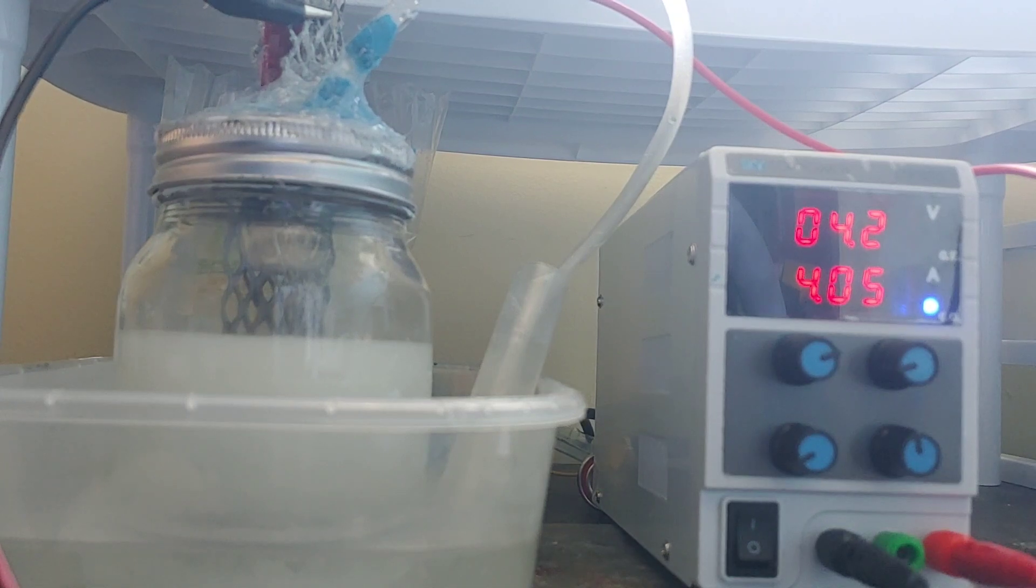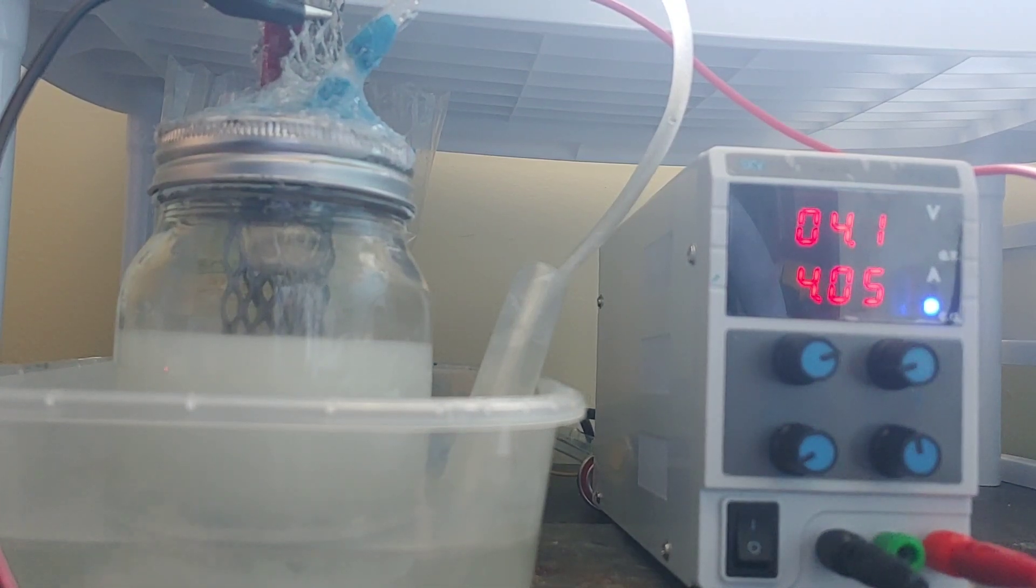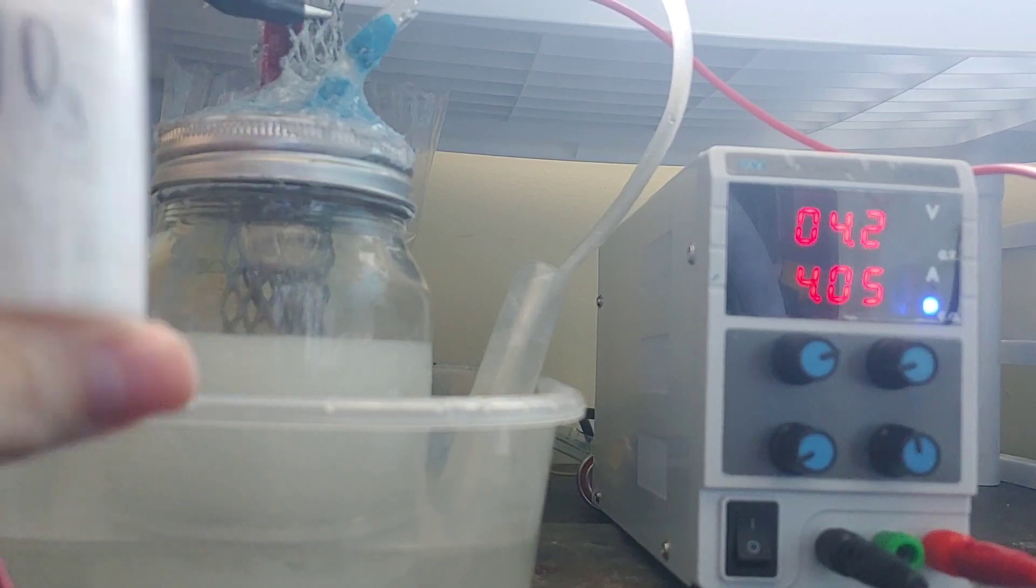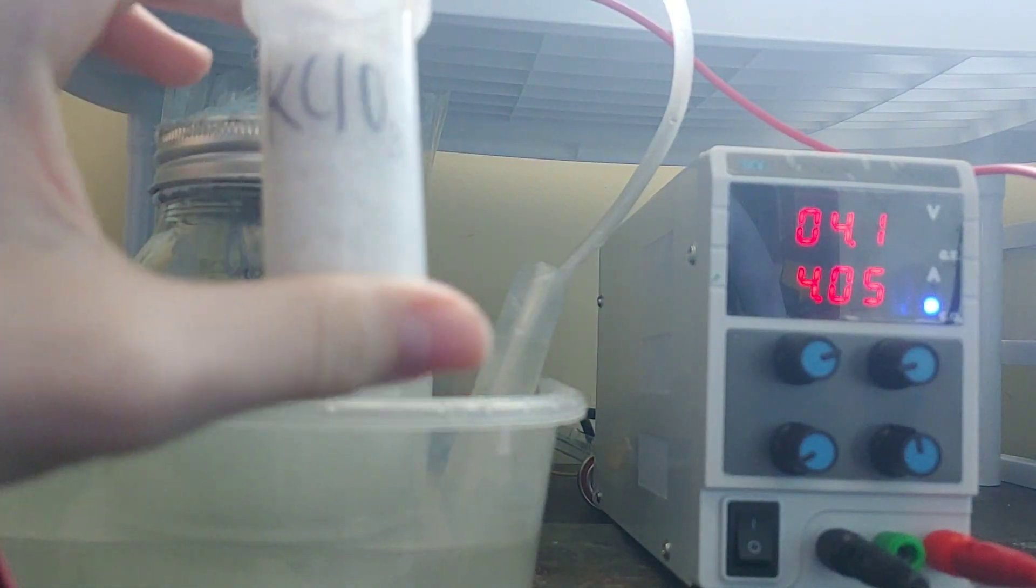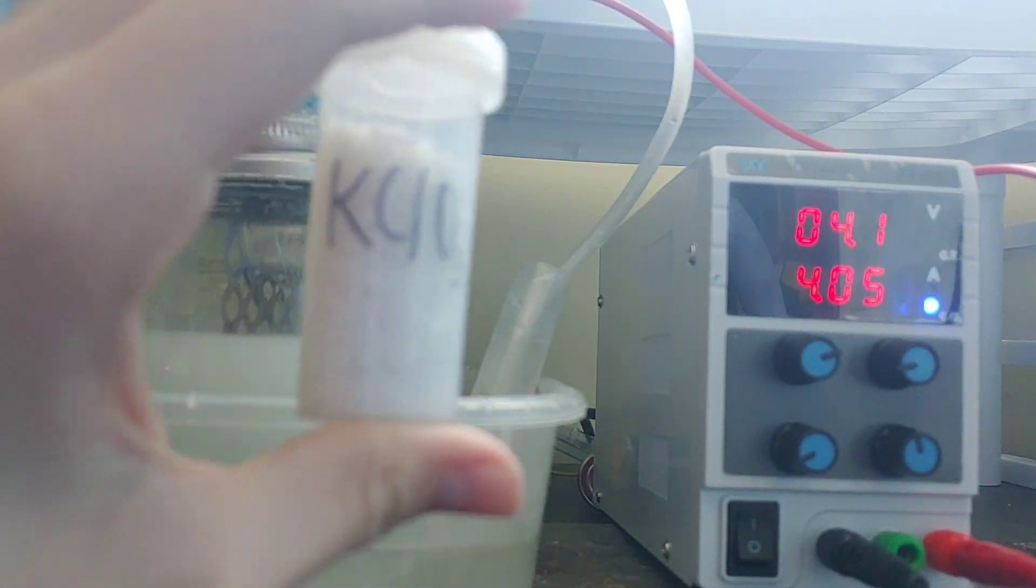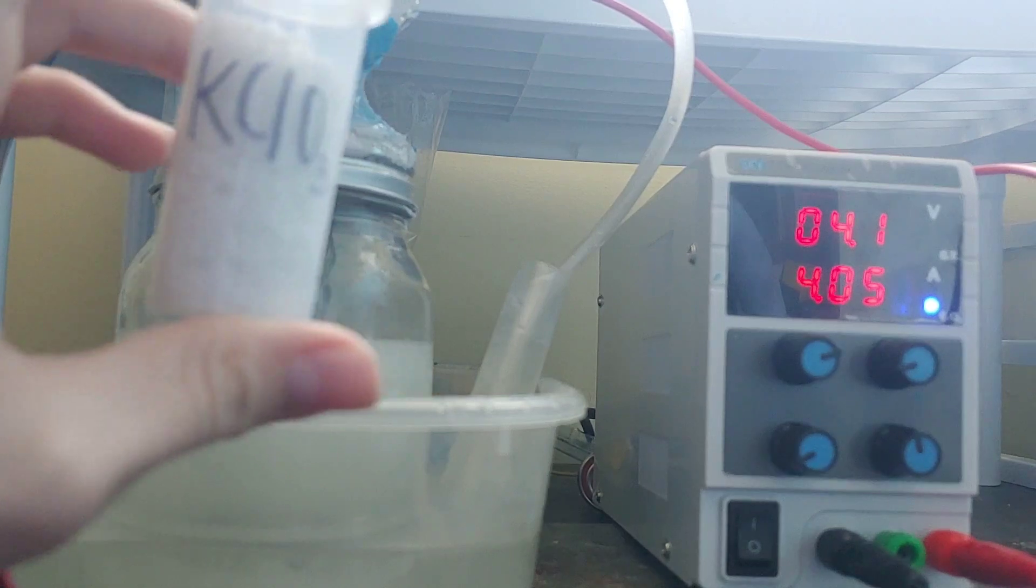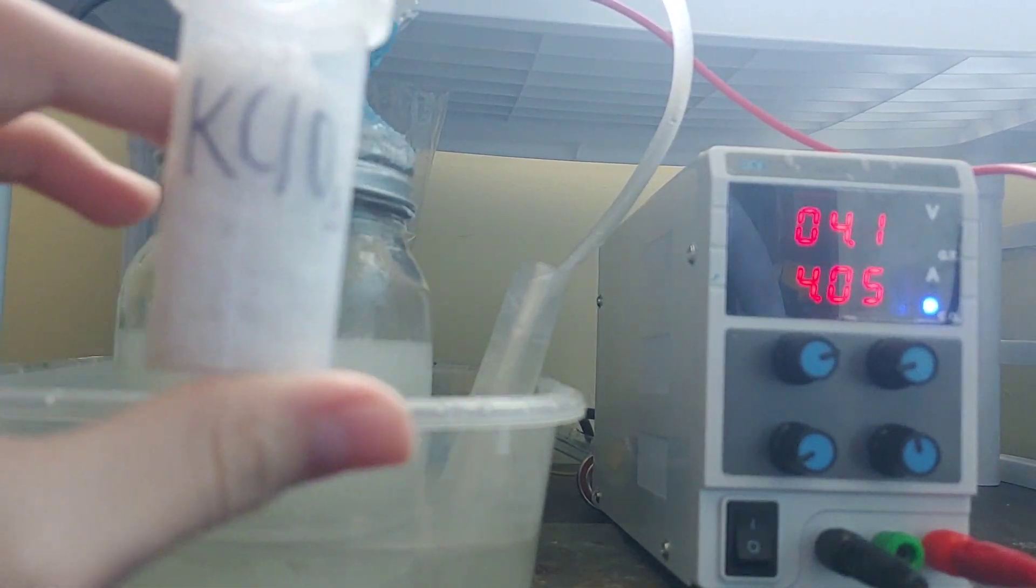It's not a hazard. Well, I mean it is, but to a manageable extent. So yeah. This is the chlorate cell right here, and I got a bit of yield already. I just extracted it after one or two days, running it at like one amp, or not even. I was being very generous. Barely put any current in there. And I got this. I tried it out. It burns. I'm pretty glad to say.